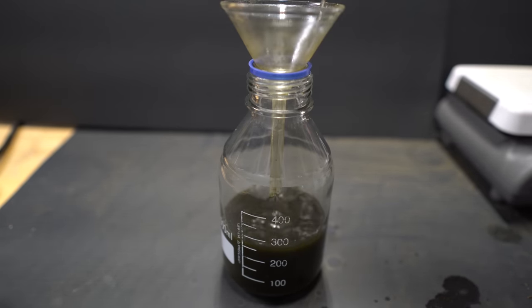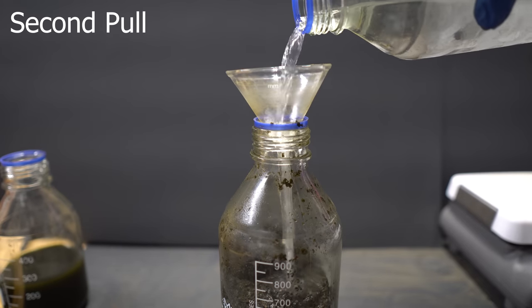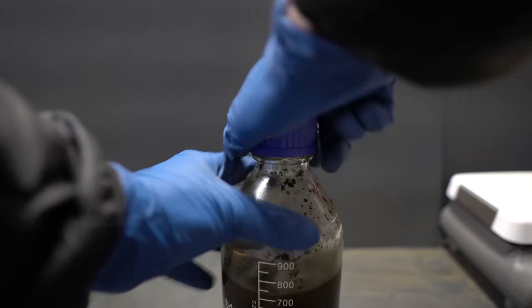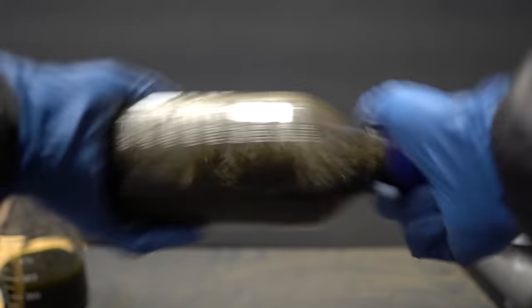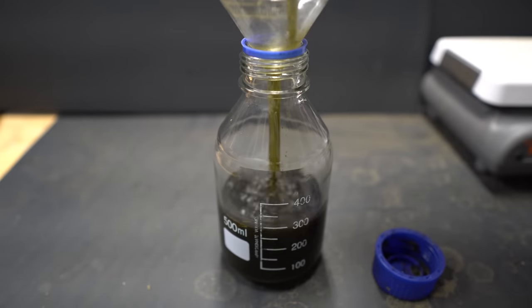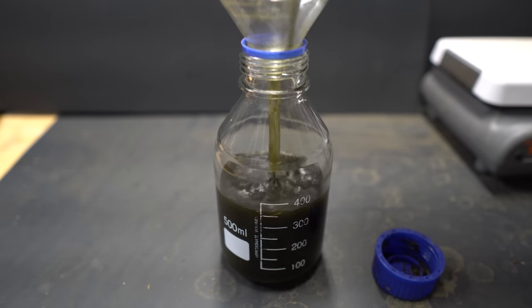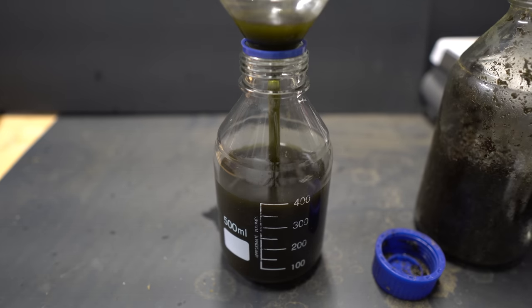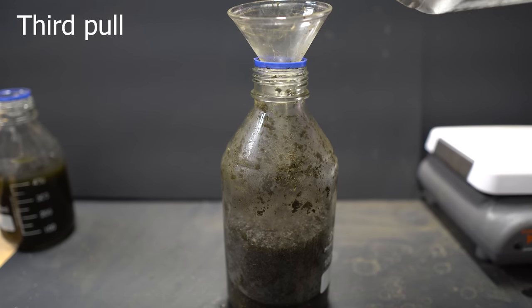This was fixed just by using my spatula and it all flowed out. We're now going to start on the second pull and again it's very important that you fill the acetone so it covers all of the leaves. Everything is shaken and you really want to make sure that the cap is cleaned out every single time because it did leak a little bit when I shook it.